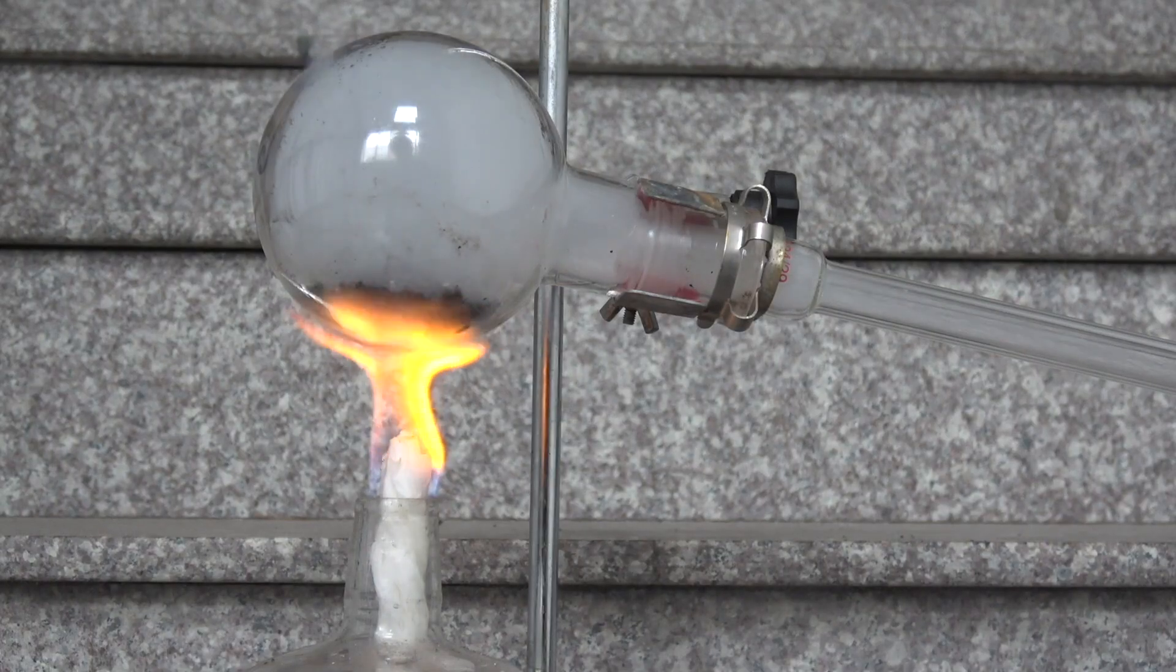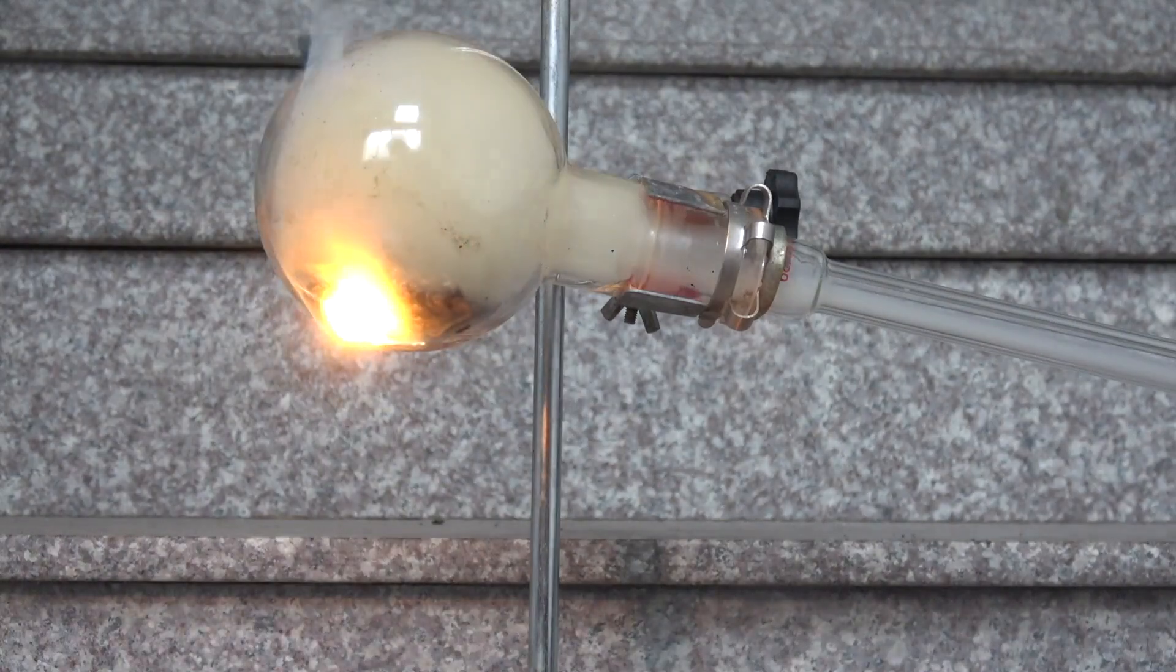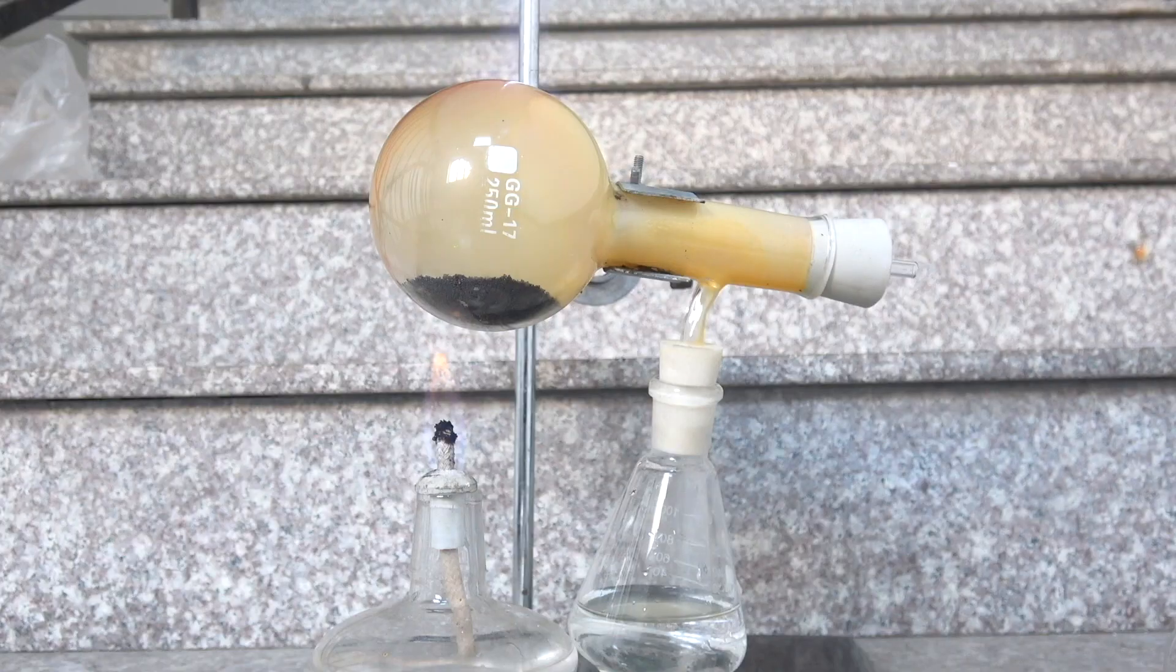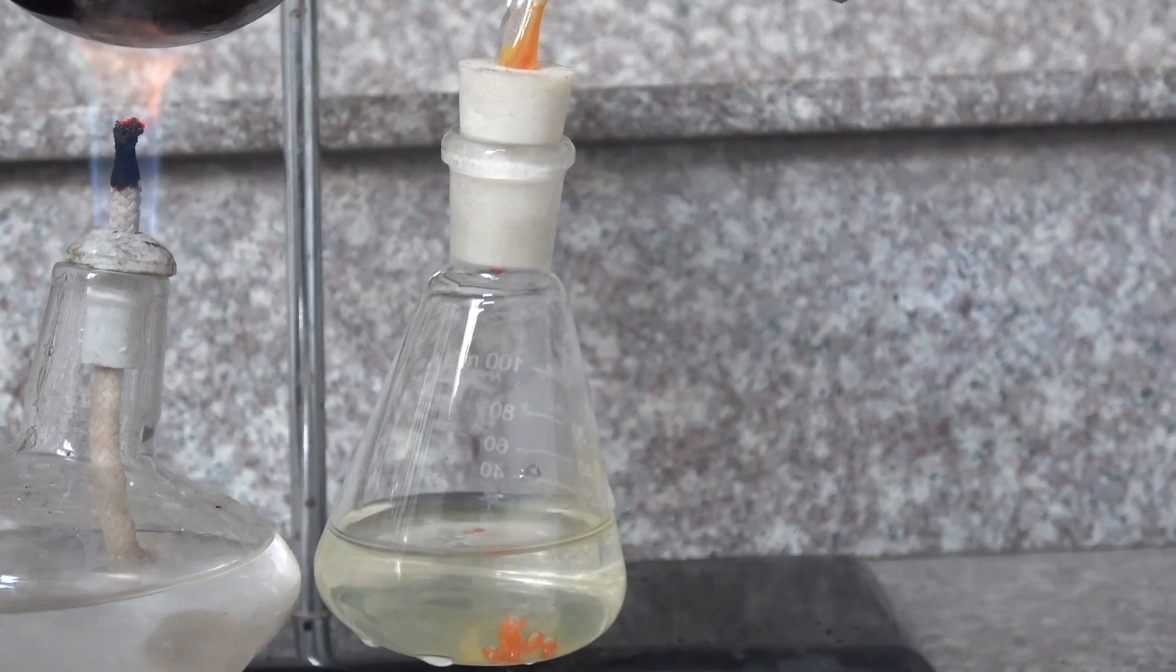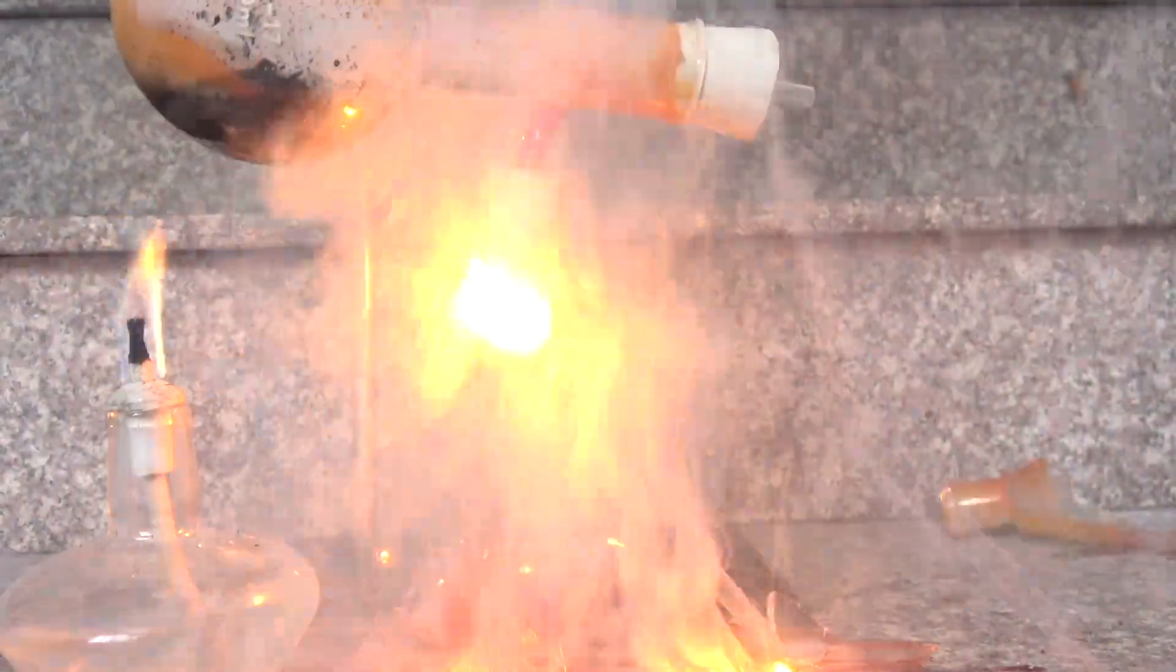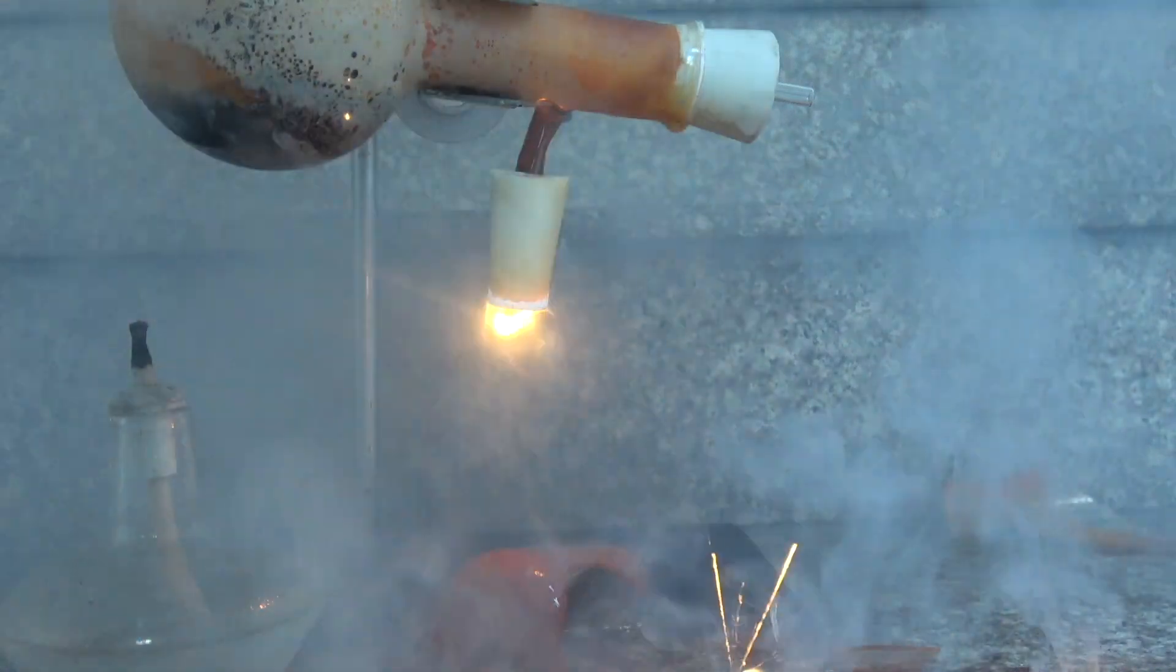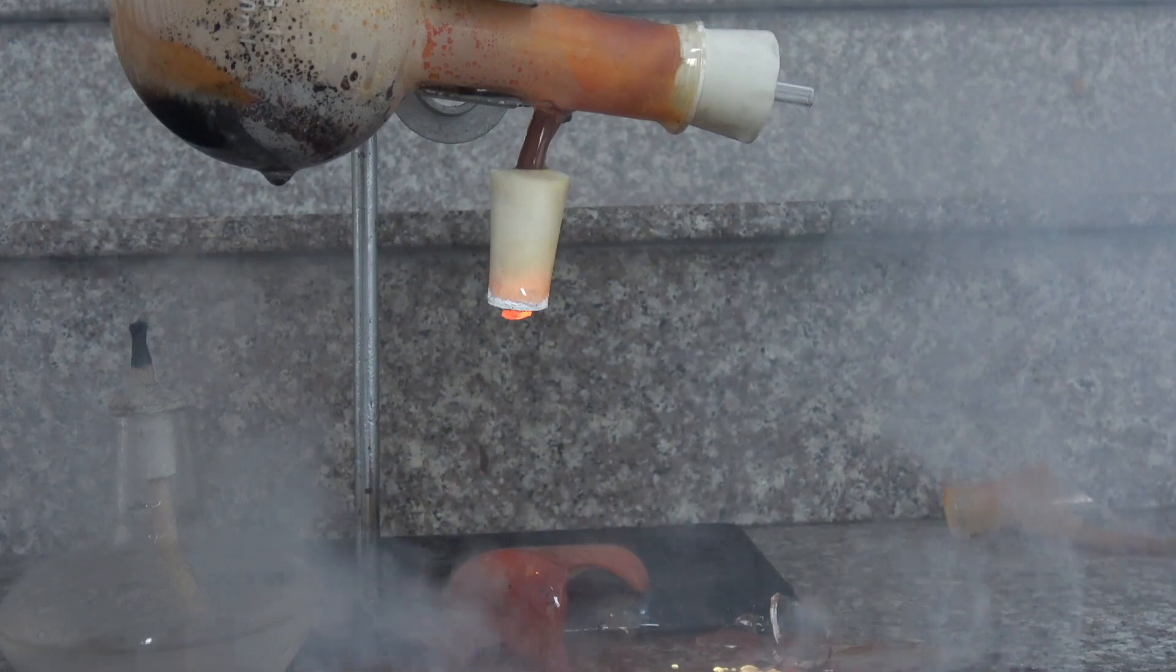And of course I didn't come up with that setup on the first trial. I had about dozens of failures, broke god knows how many glass wares, went through nearly half a pound of precious red phosphorus, even had a very close call with a mini version of the world's most notorious incendiary weapon going all over my face. Since this is the contracted version, I won't be including the part where I failed miserably, and only show you the successful trial.